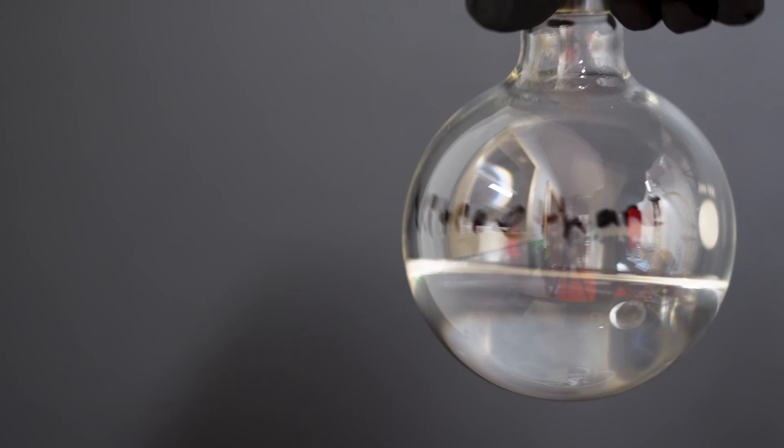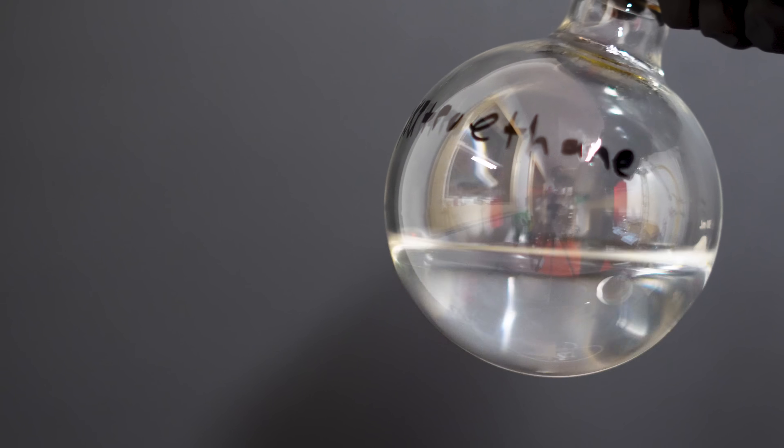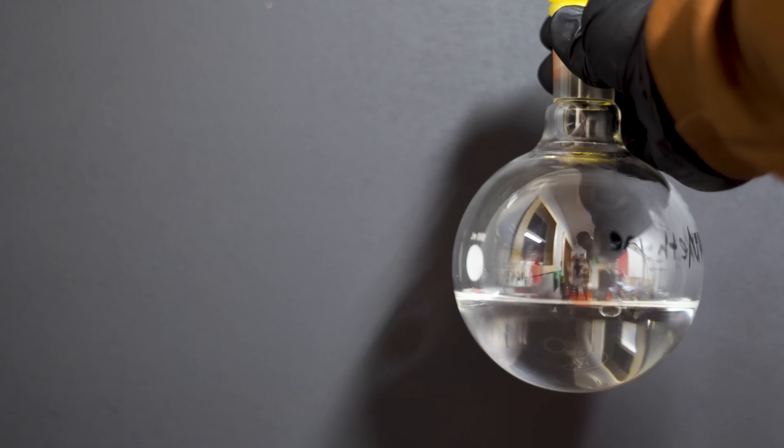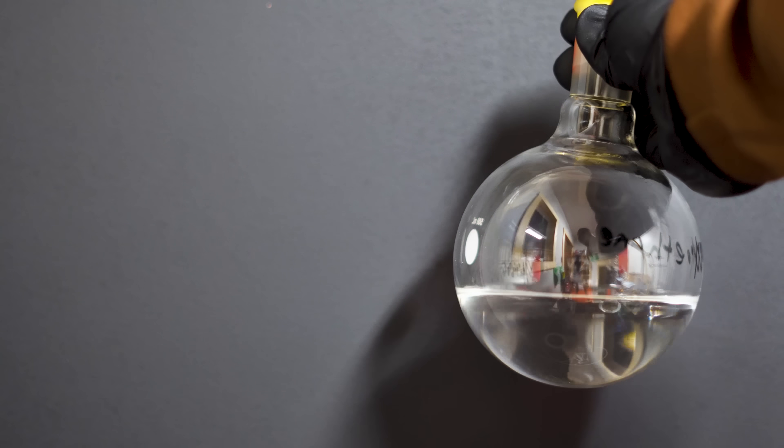And our last fraction of nitroethane, which likely has a small impurity of butan-1-ol. I'm hoping that it's relatively pure and there's really not a lot in it, but I would really need to run it under a GC-MS or an NMR.